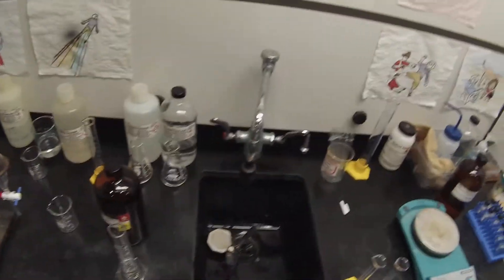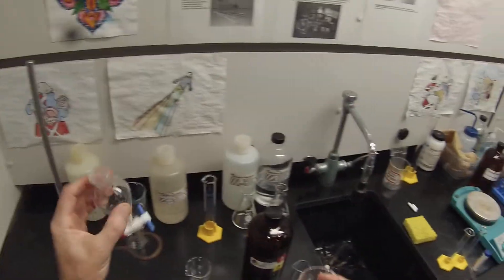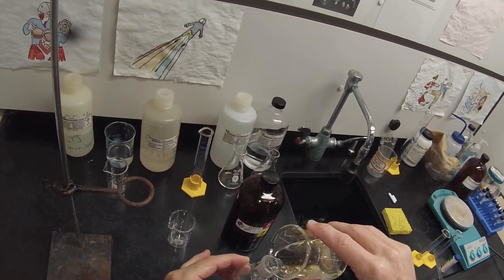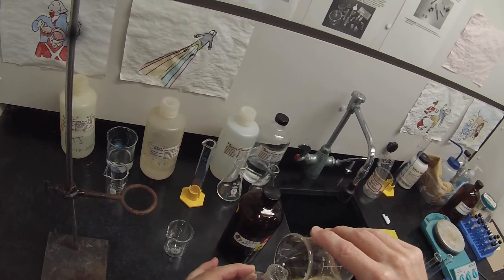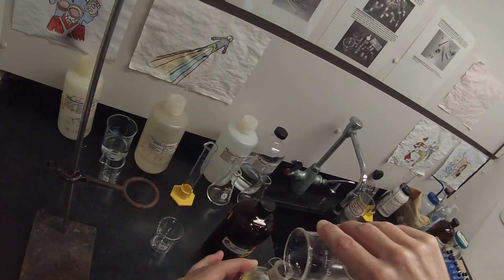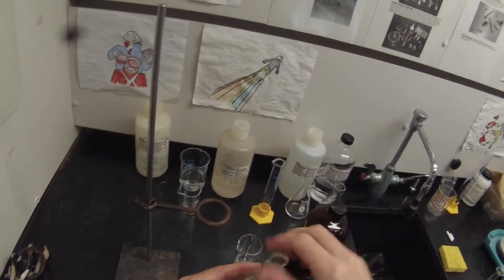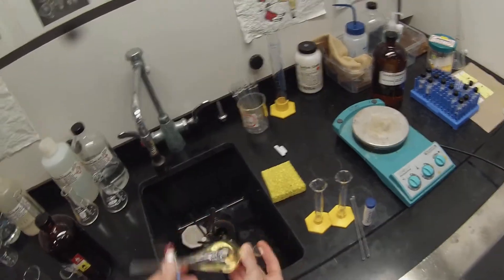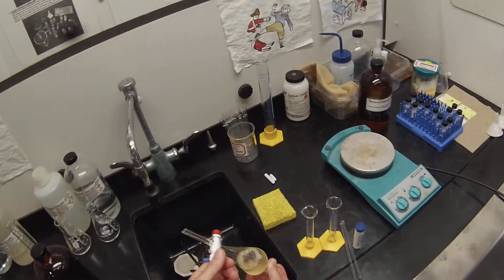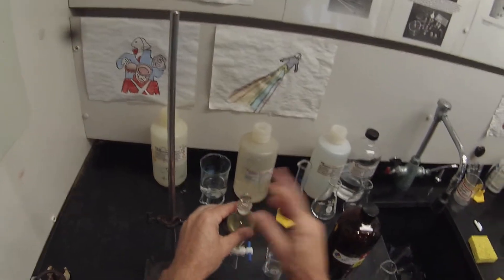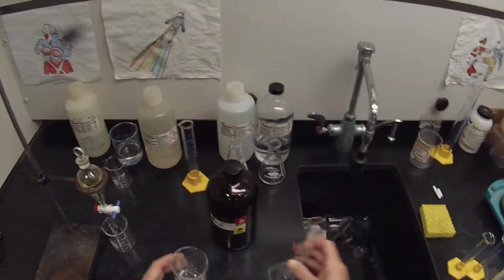You can take that stir bar out, be careful not to let it end up down the sink. We can transfer this to the separatory funnel. It's really not necessary for me to mix those layers significantly in the separatory funnel since they've already mixed pretty well while stirring, but I'm going to shake them around a little bit anyway. There's no pressure being released, which we wouldn't expect.